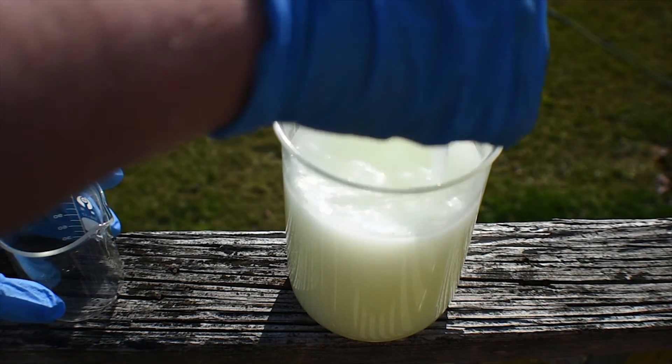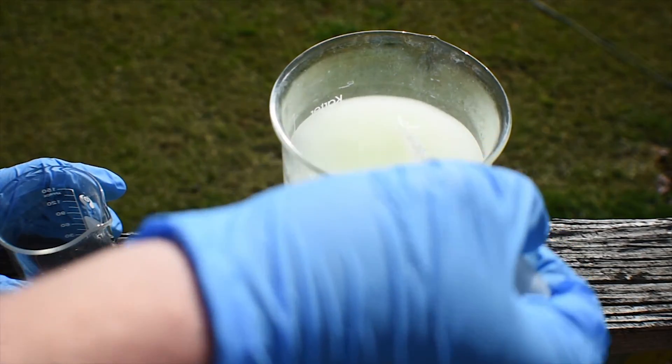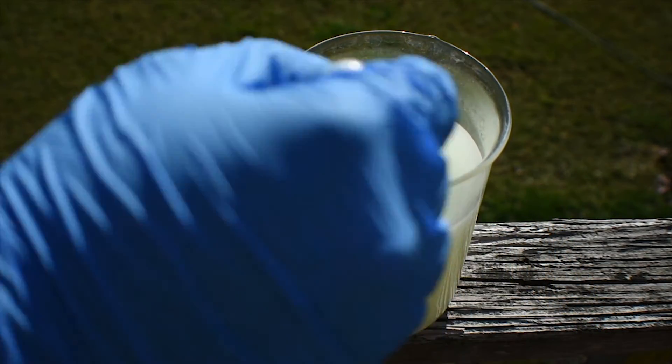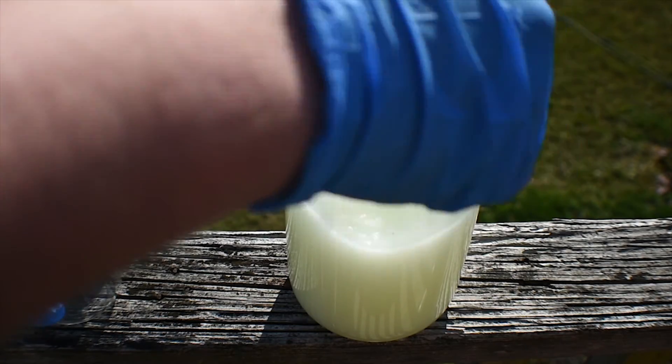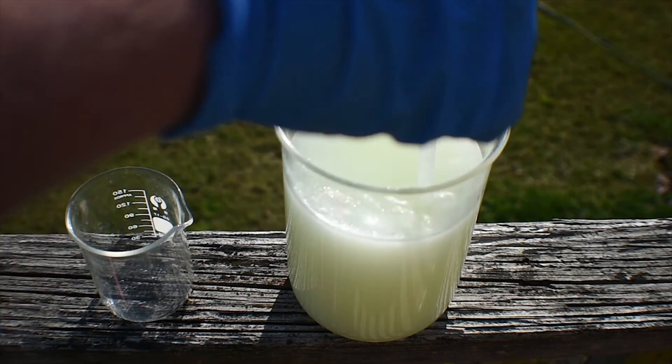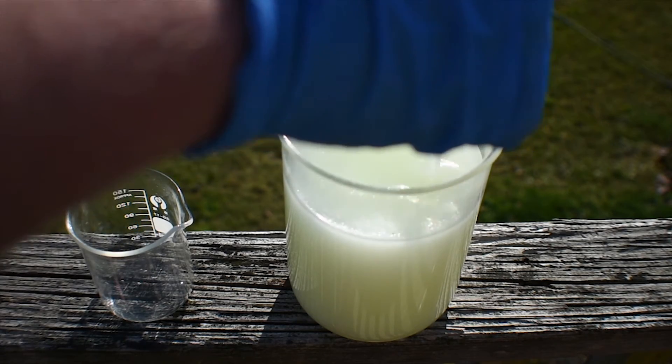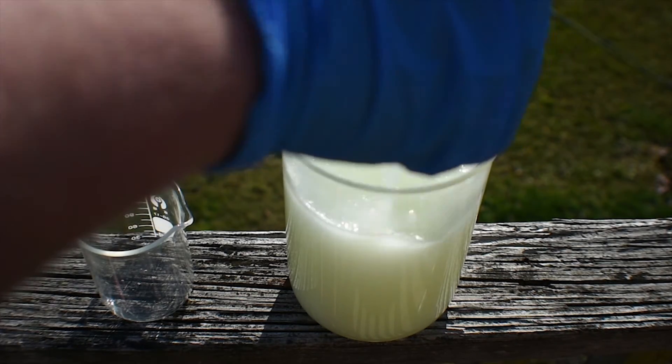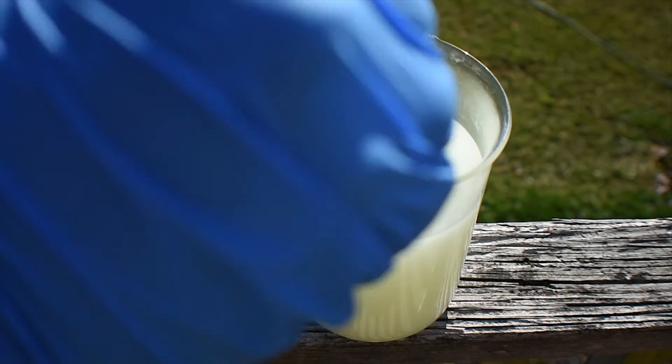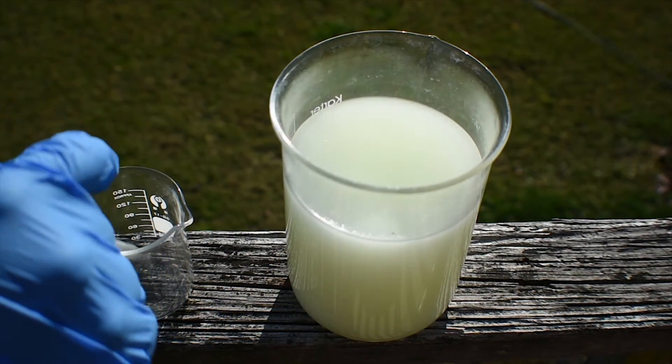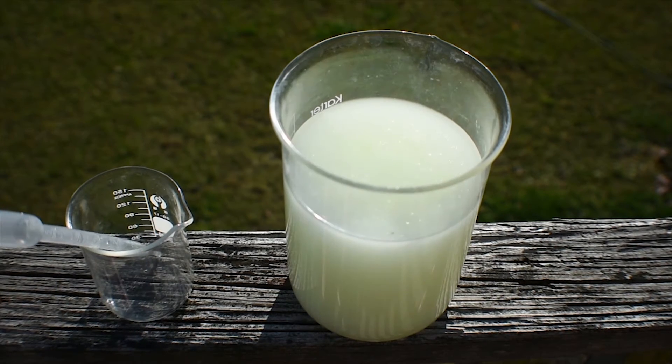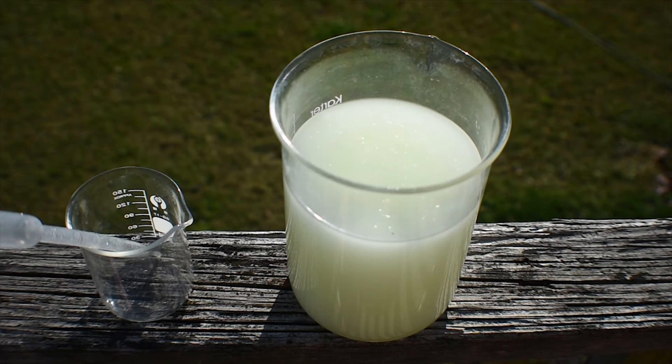If you've ever made chloroform before, this will sort of act like that. Where you can just sort of check the bottom, you know, it'll be there. So, I'm going to stir this for a little while longer, hopefully get some of these tiny droplets to coalesce, that's the word I was looking for, into larger sort of droplets, and collect to the bottom. So, I'll come back in a few minutes, hopefully we'll have a nice layer of tetrachloroethylene diamine on the bottom. Your eyes are definitely going to be burning in this if you don't have super good ventilation. It's not a really windy day, thankfully for the camera's microphone, but not so much for my eyes.